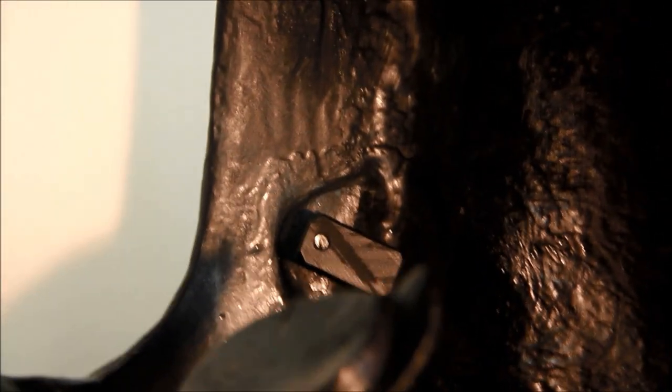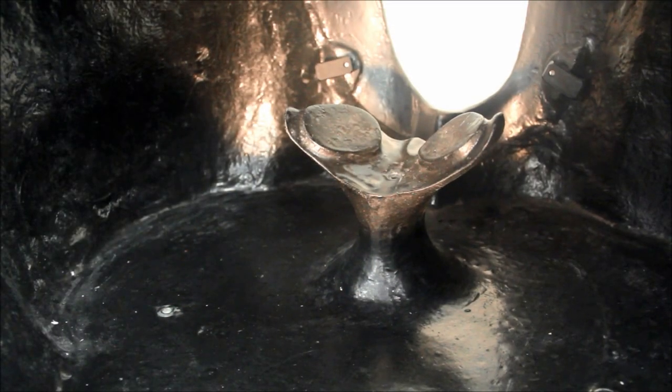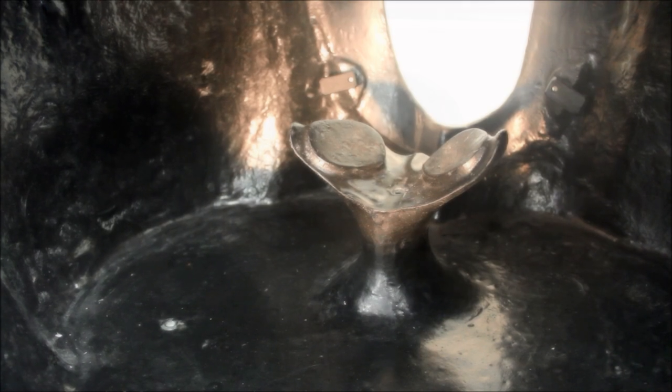Within the body of the horse, you will see four twist locks that are used to hold the palpation panel assembly in place, as well as the mount that the pelvis will sit on.